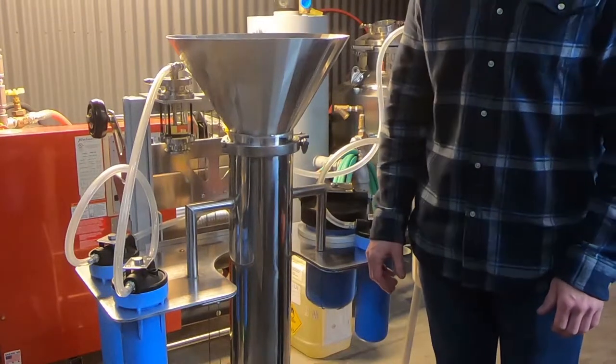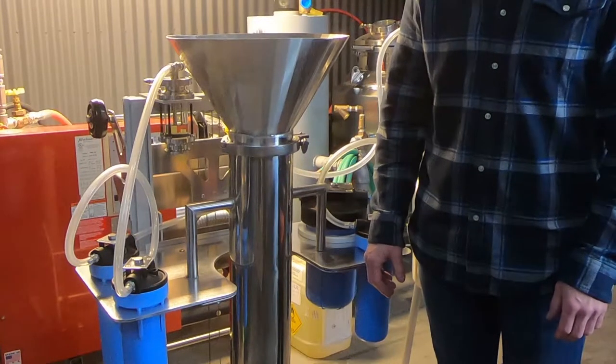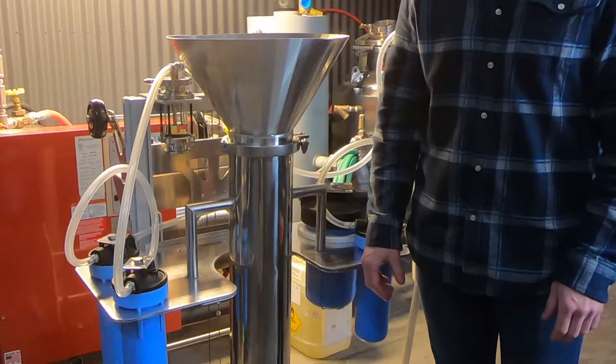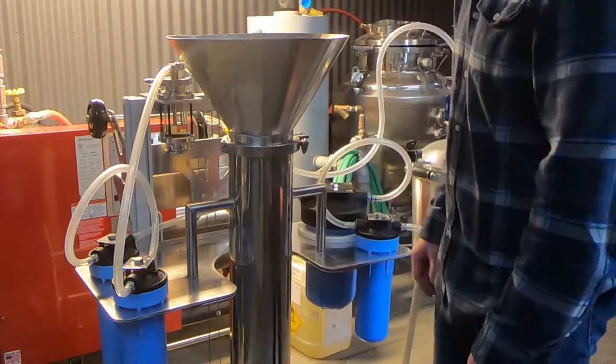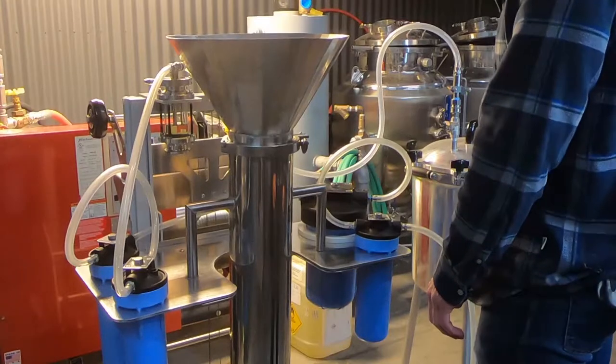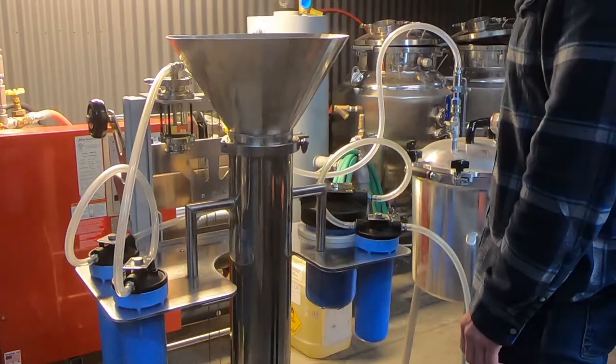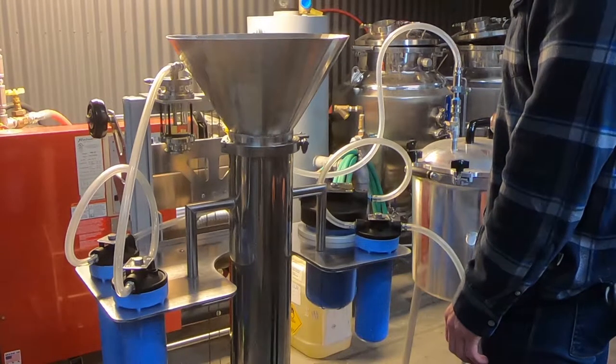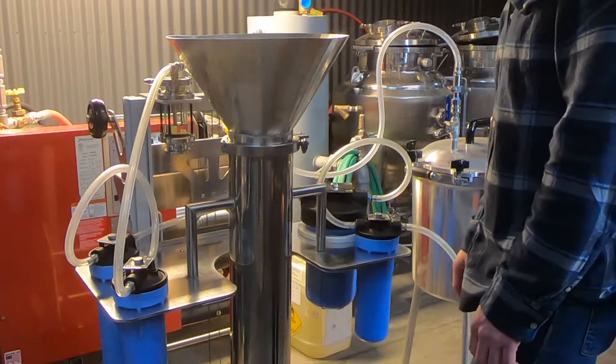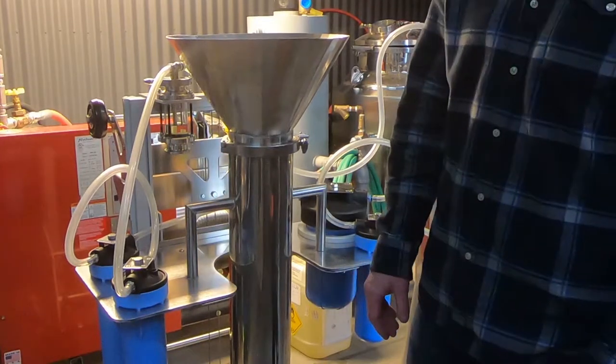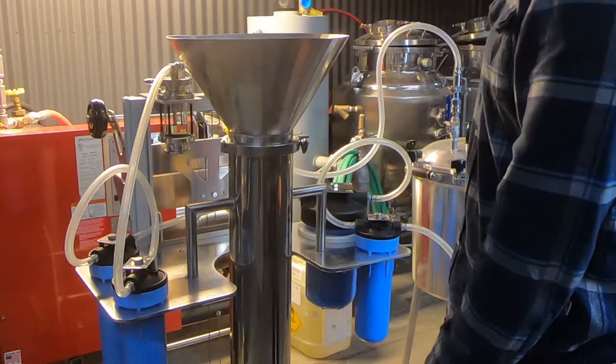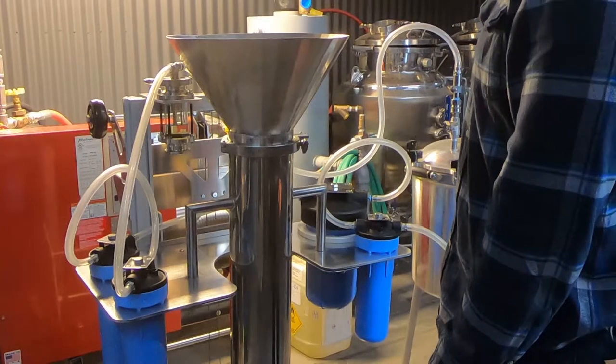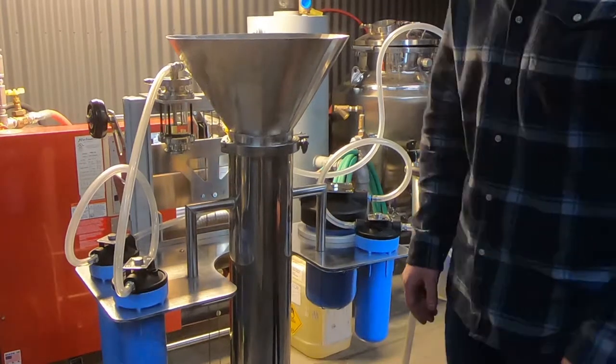Today I'm going to show you guys how to winterize without a chiller or a cryo freezer. I'm using the CRC filters EP05. I love this system, it's super easy to use and the end product doesn't require distillation. That's a huge bonus for me, saves time and money all around. Let's get going.